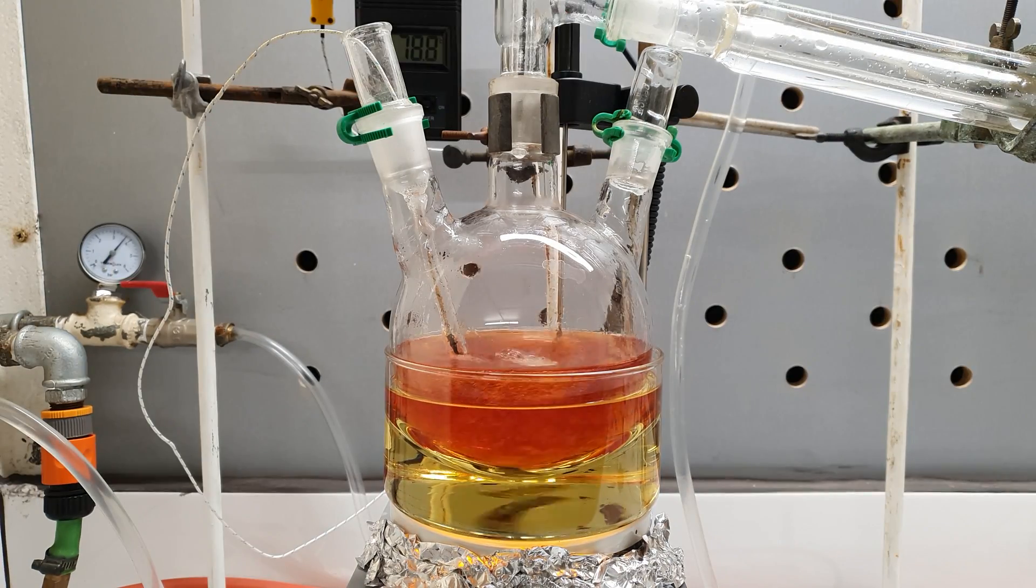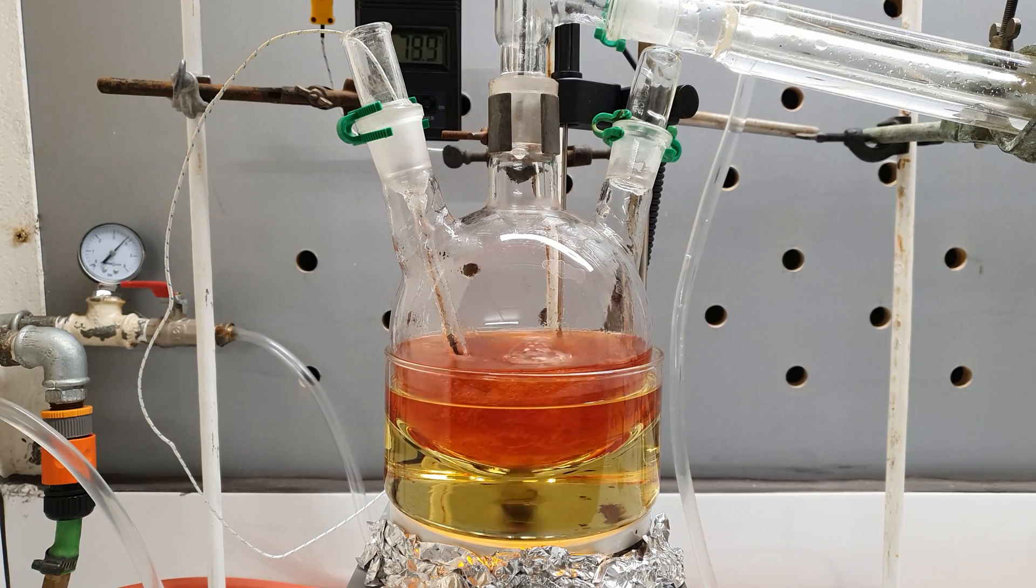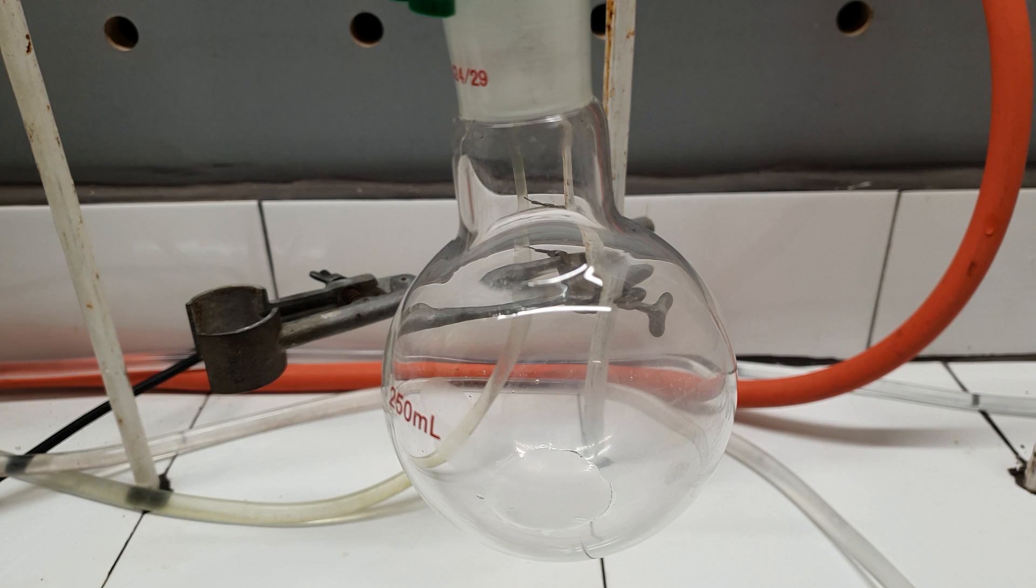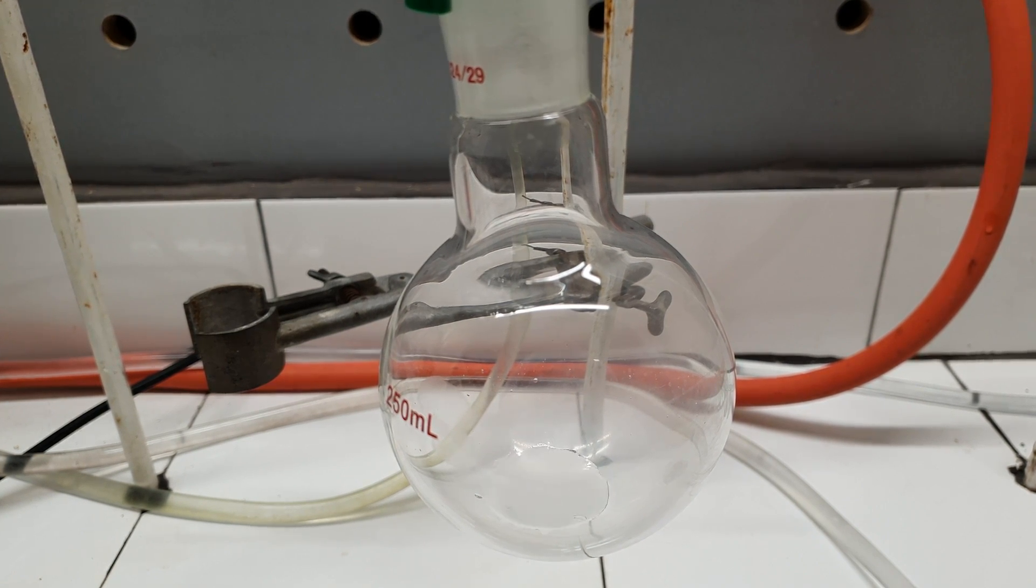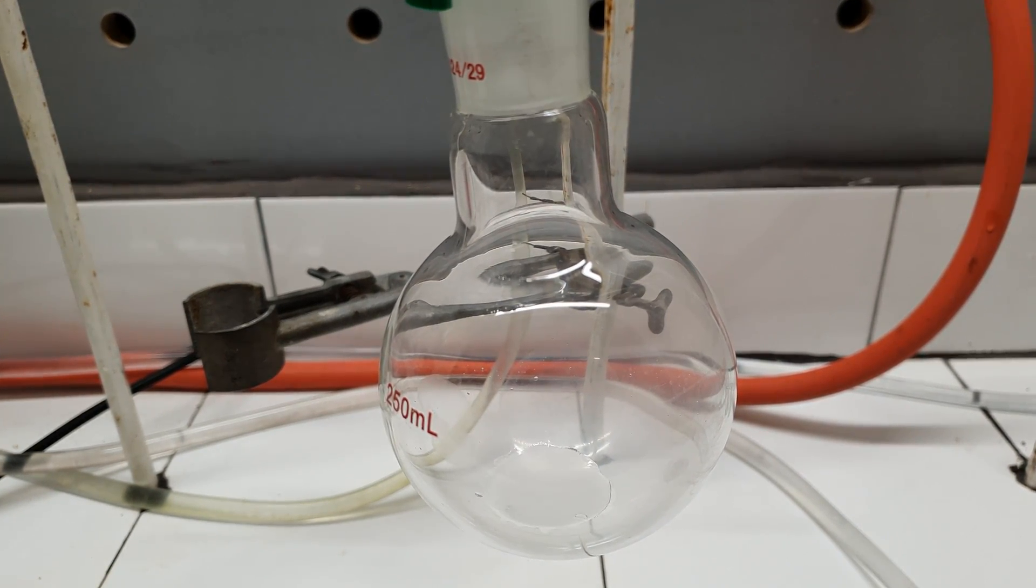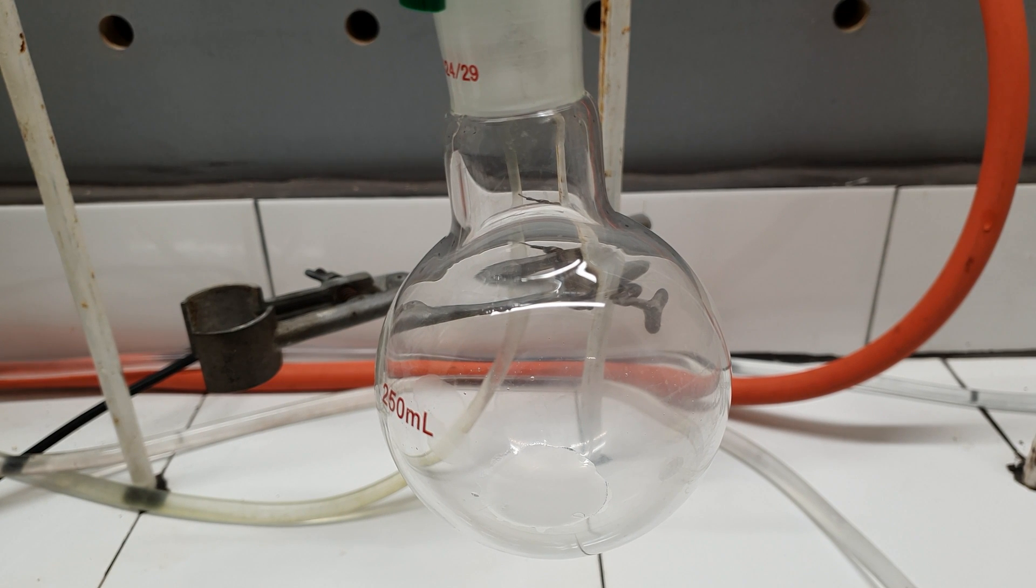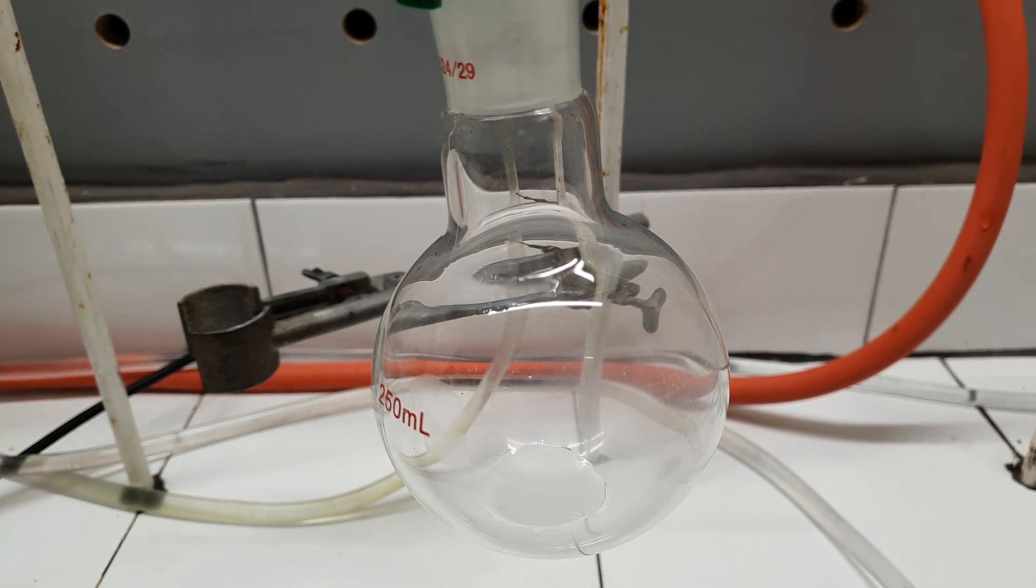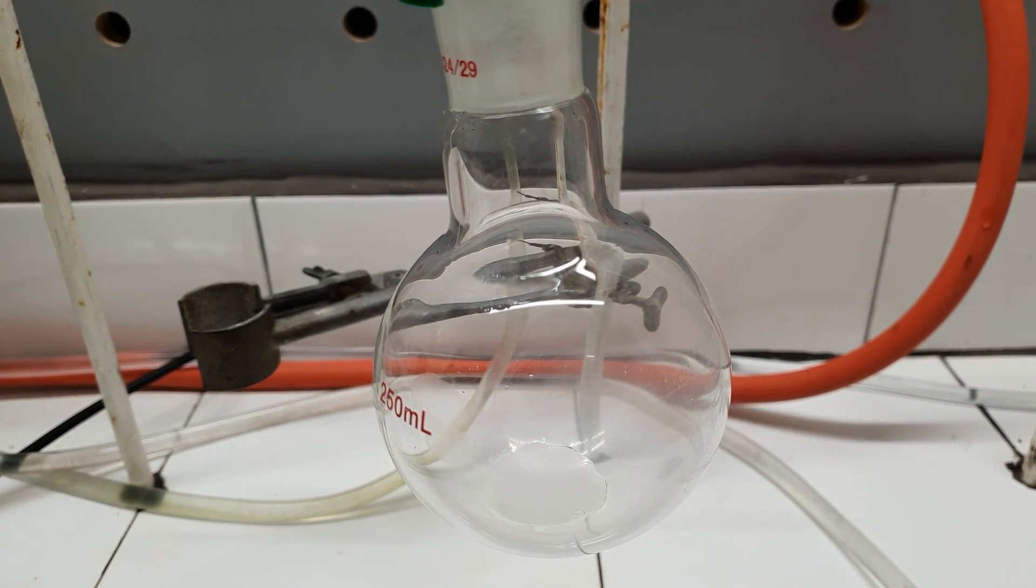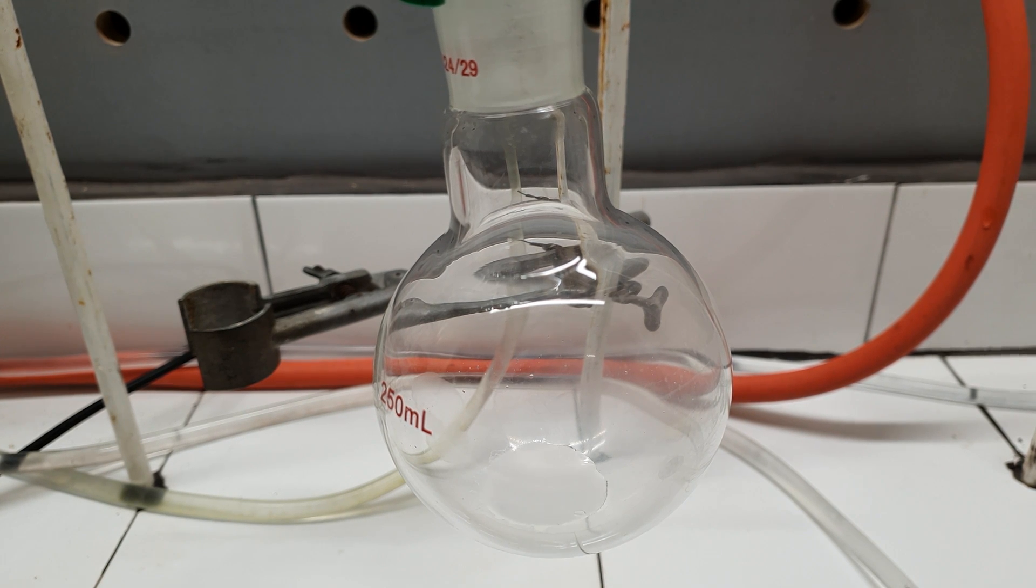Above 80 degrees the reaction was very noticeable and some of the vapors reached the condenser and ended up in the receiver. The distilled liquid was very milky which indicated it was containing nitromethane.